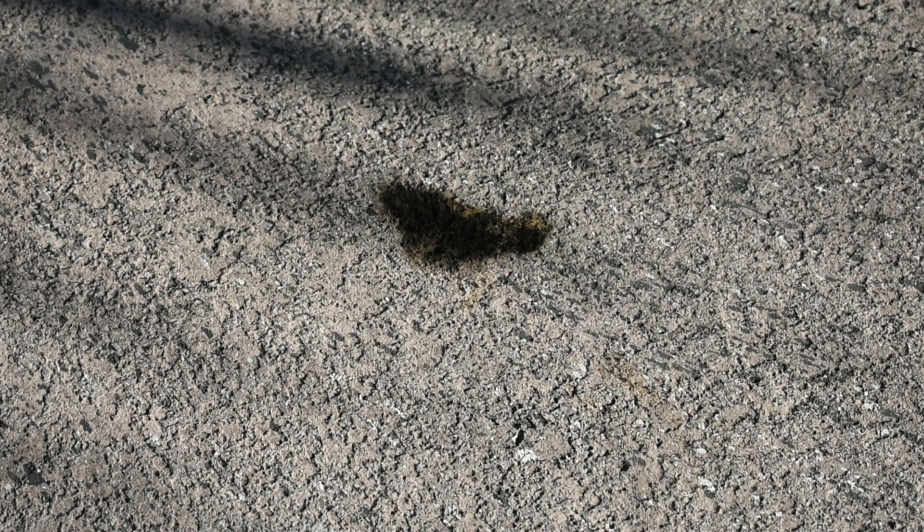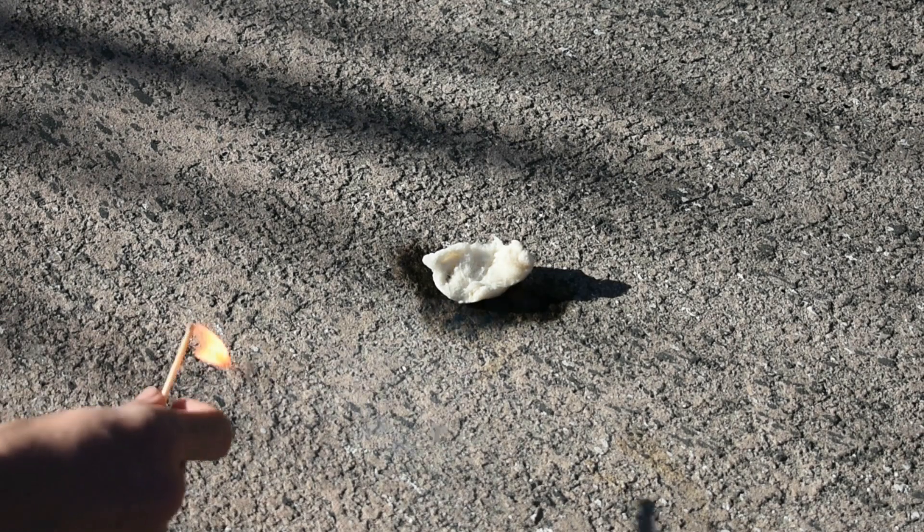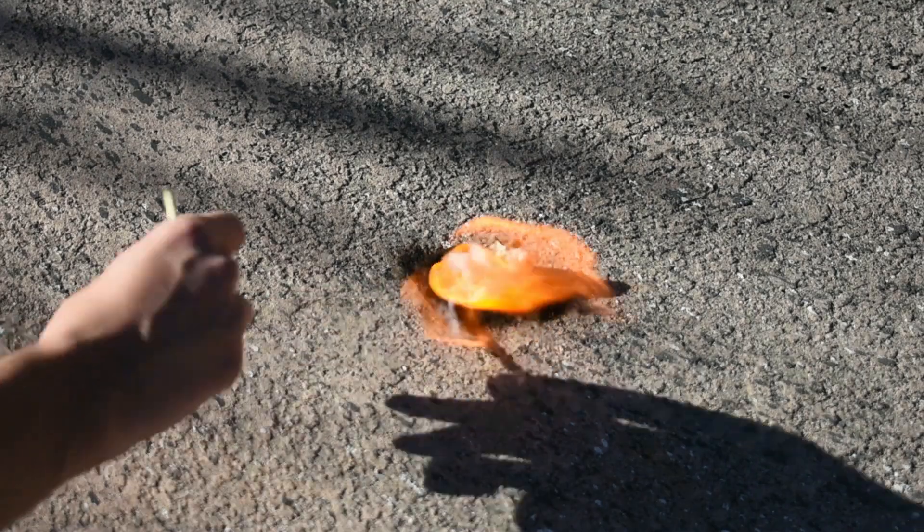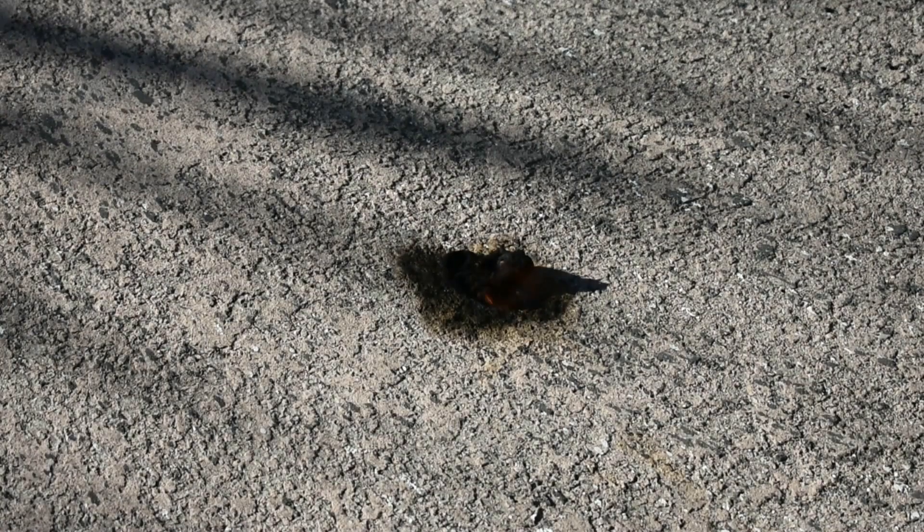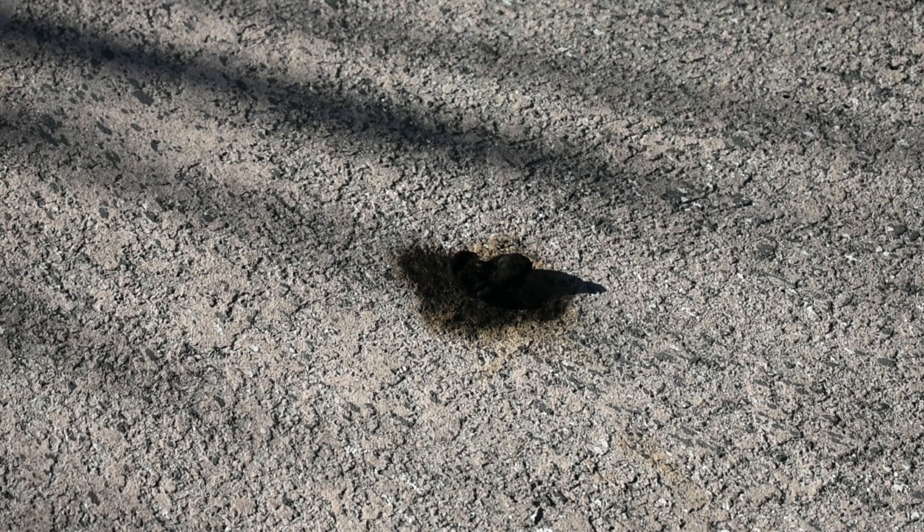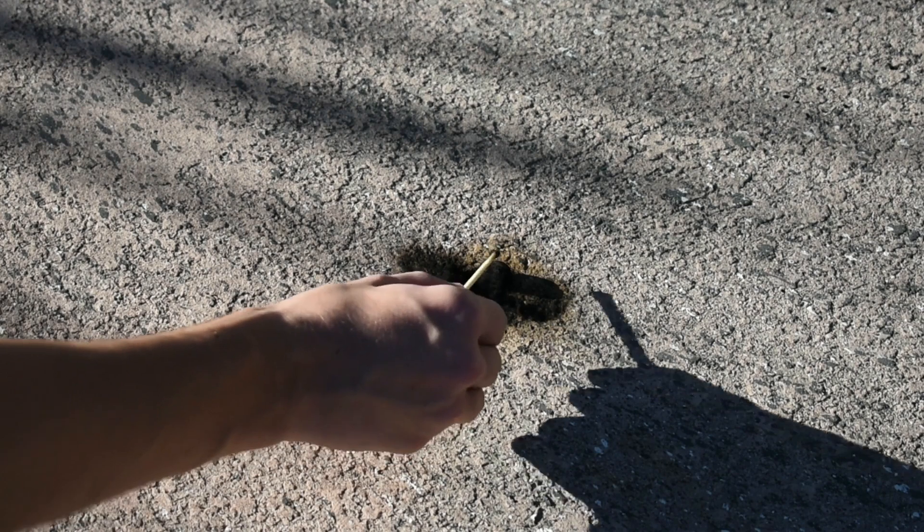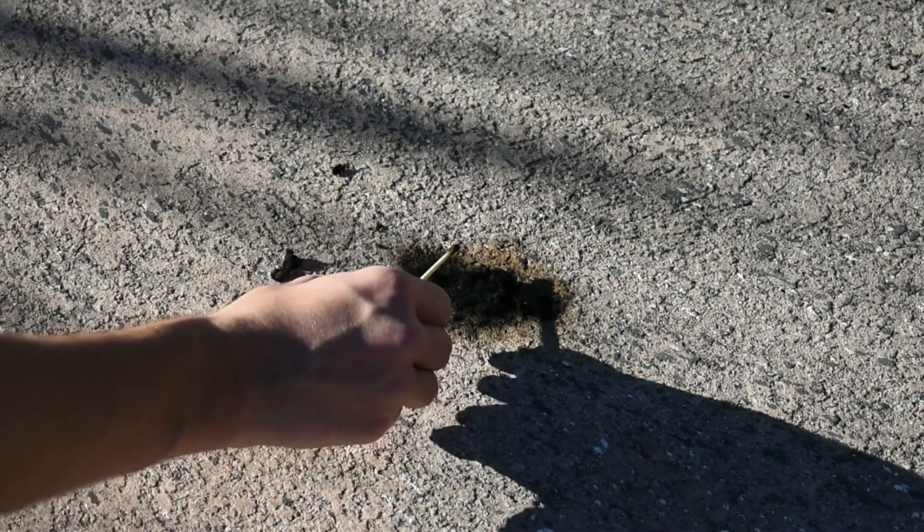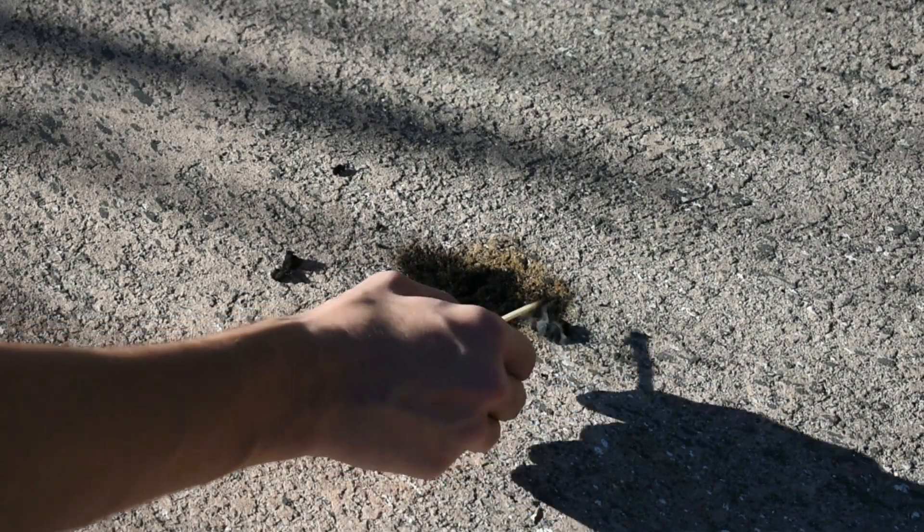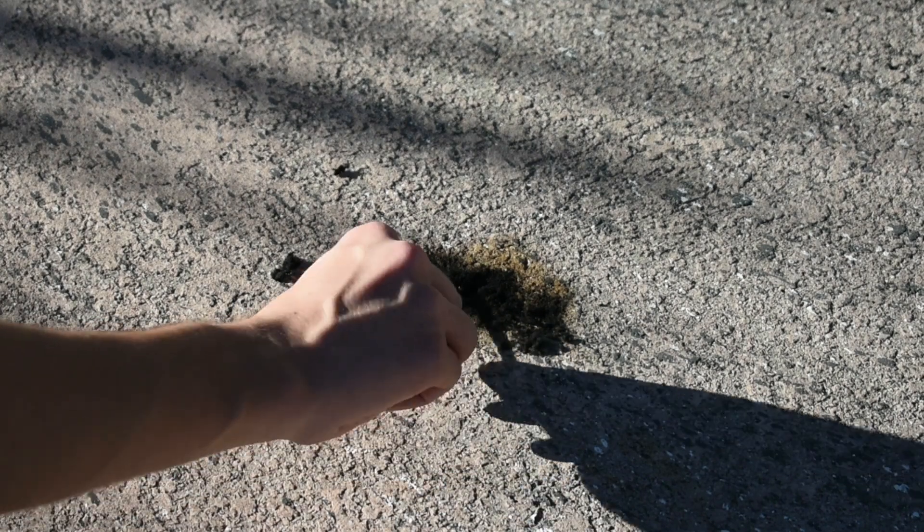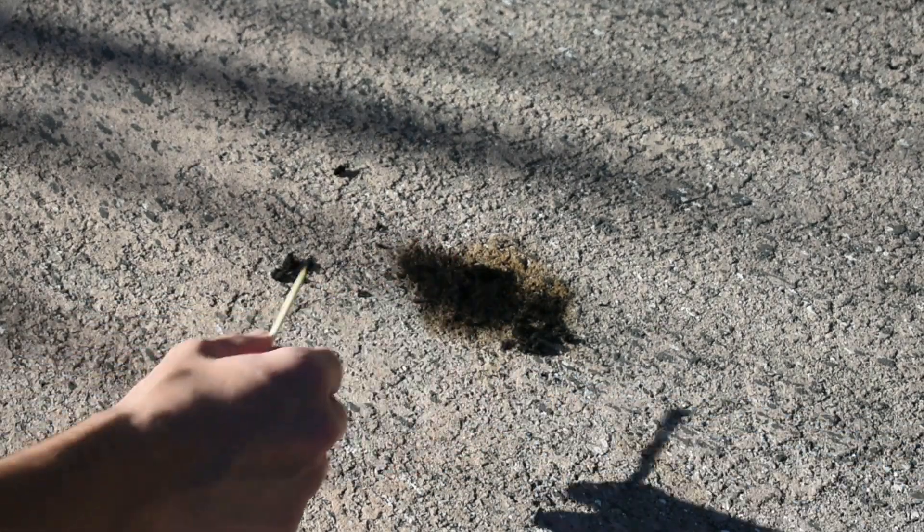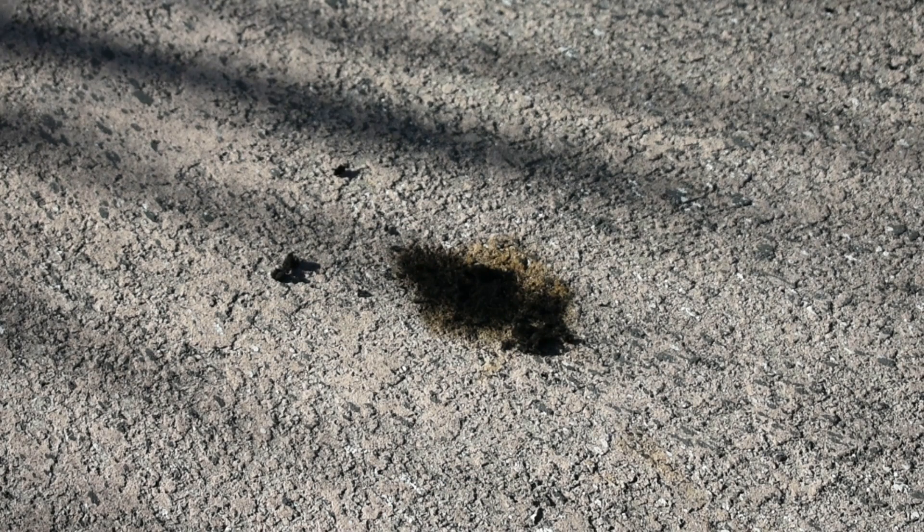Now we can move on to our larger scale test. I will do one of the cotton balls. I'll do the cotton ball that fell apart a little bit. That one's a lot more intense. Once again, leaving behind pretty much pure carbon, I assume. It's very fluffy, very not dense at all actually. It's kind of like powdered sugar, but it's carbon of course.